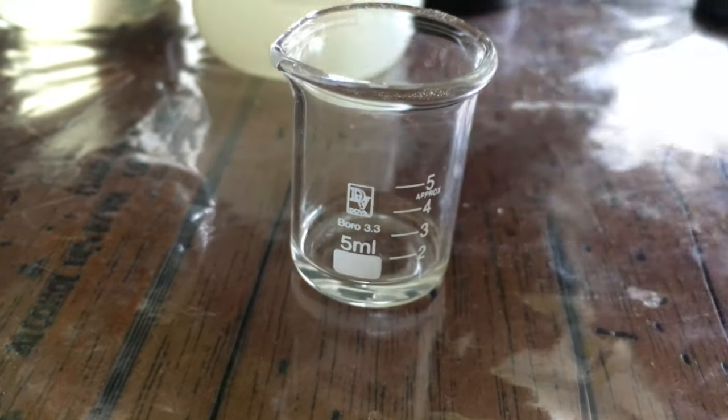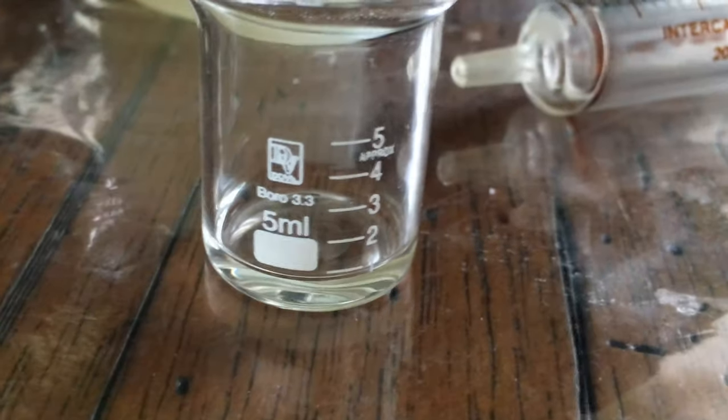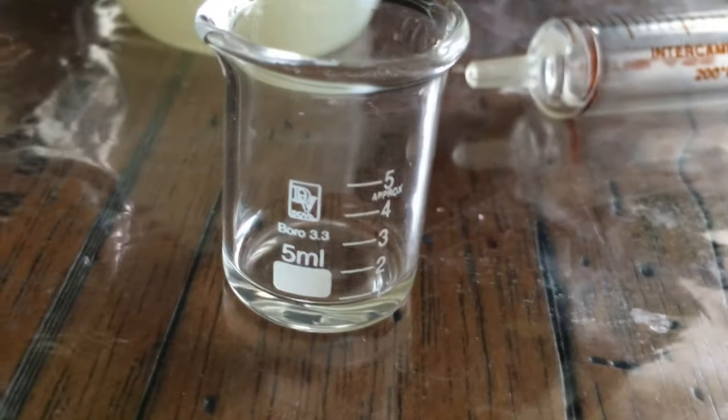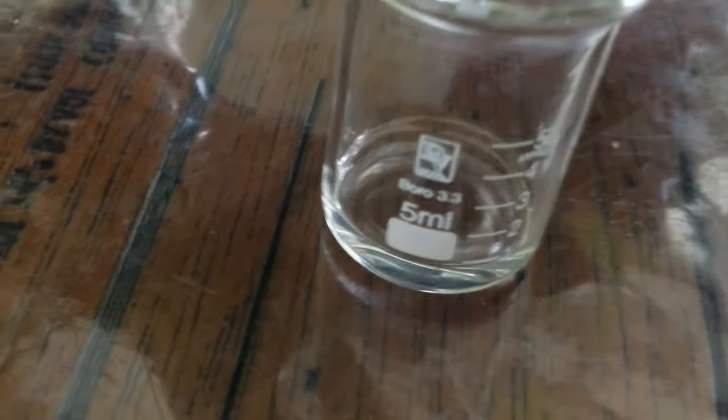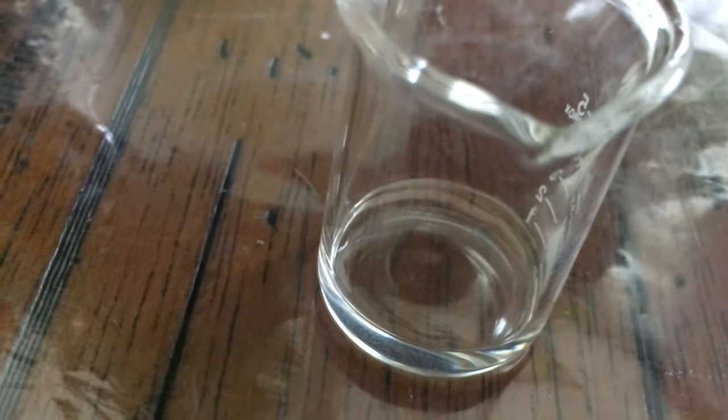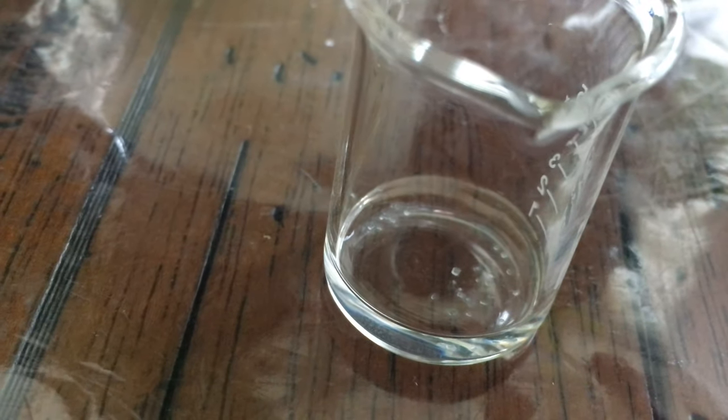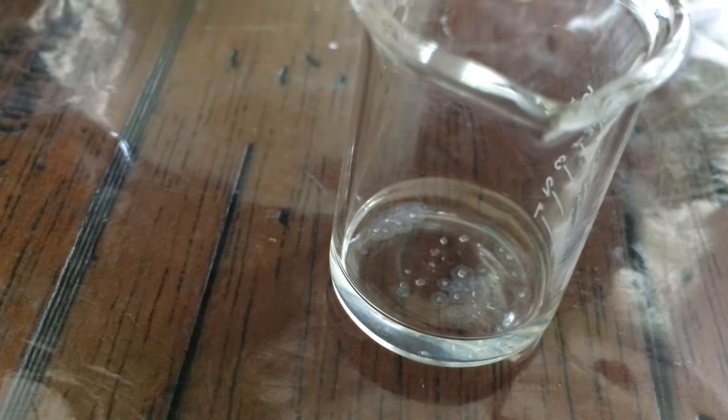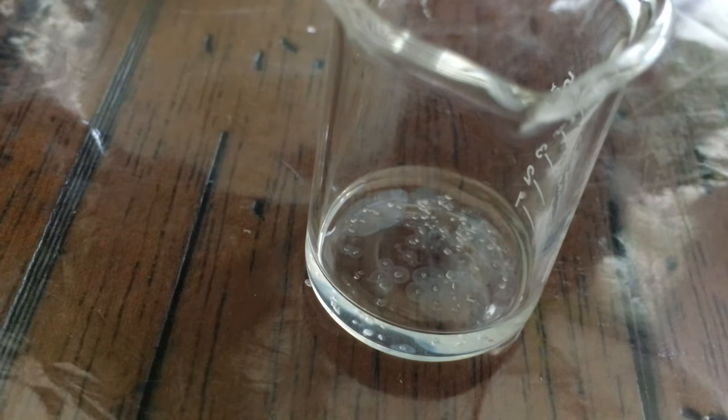I was able to recover that lost milliliter that was in between the water layer and the ethyl acetate. I can't really measure this precise, so I'm just going to sprinkle some citric acid until it clouds a bit.